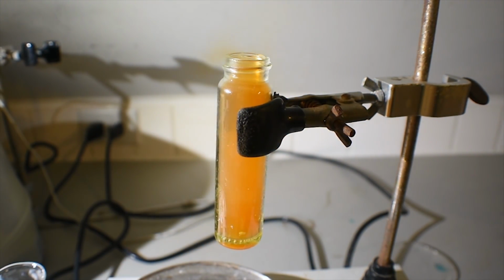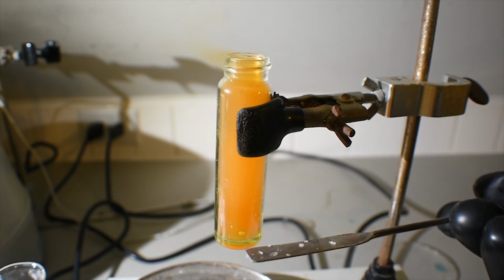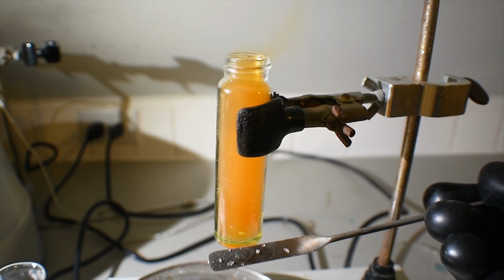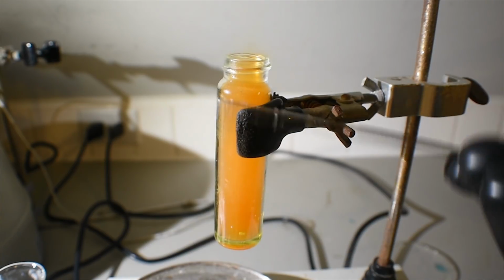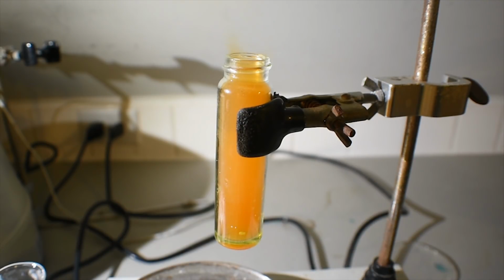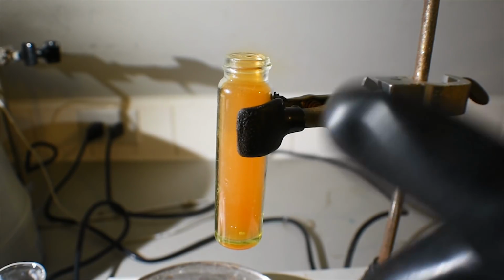Yeah, now, just go in my shoes for a second. I tried preparing this a few days ago on a scale about 10 times this, inside. Are you crazy? You can already start to see how things went down then. A very violent reaction with lots of nitrogen dioxide and some sulfur dioxide produced. There's probably some potassium nitrate left in here, with nitrogen dioxide, carbon dioxide, and some sulfur dioxide produced as gases. Very violent reaction, but if tamed correctly, it will form perthiocyanogen.